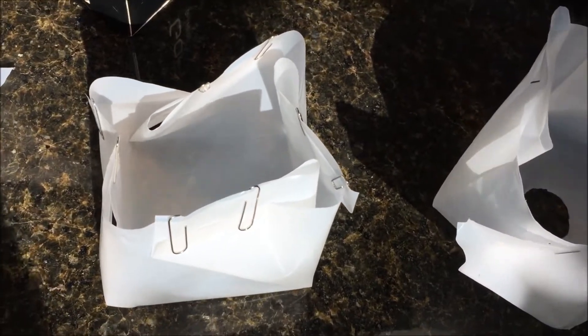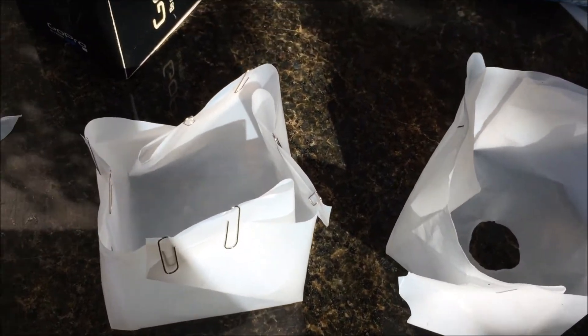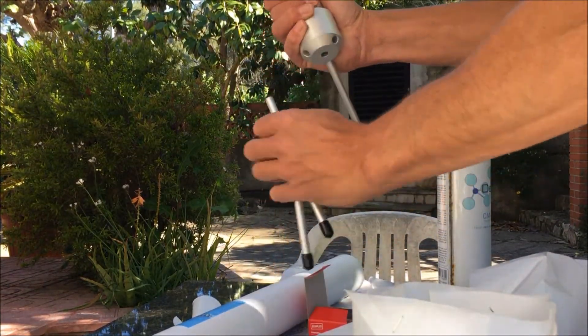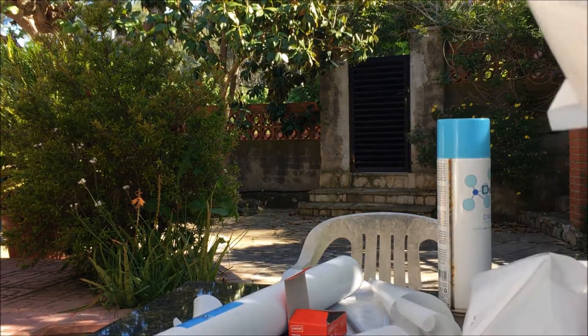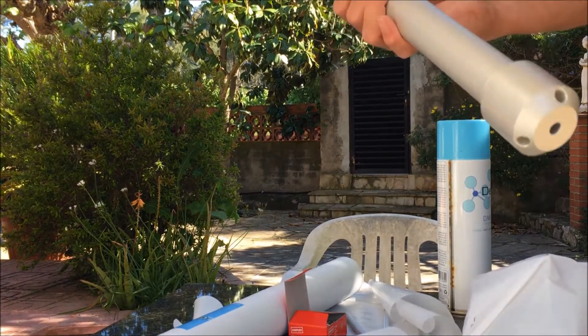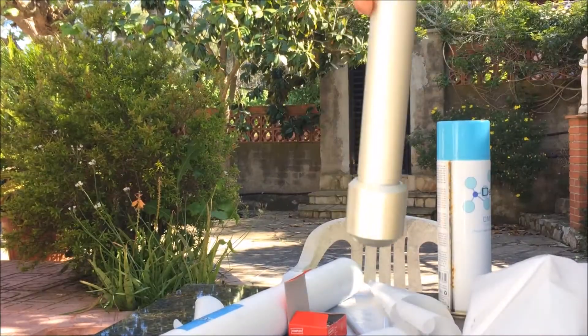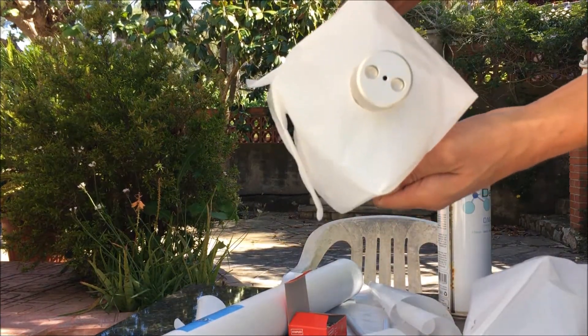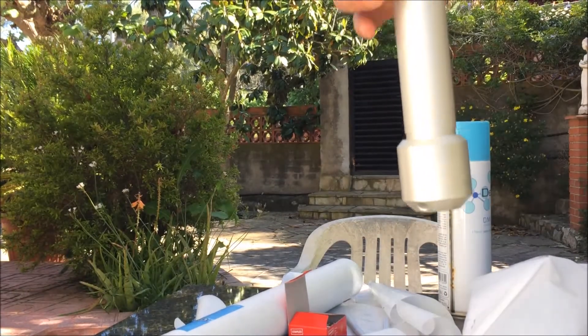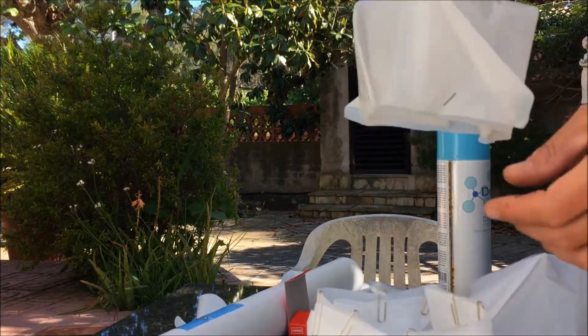Since the foil doesn't stick to the oil, you can easily get the oil out later. Using paper clips also means you may be able to reuse the PTFE foil — it's quite thick and bigger than other PTFE I've seen, so it will last longer. The hole in one box is because if we want to really shield off the extraction liquid, it has to be closed off completely. The end of the extractor should more or less end up inside a closed box. The hole is just big enough so the extractor slides through, but the lower part — which is larger — keeps it from sliding all the way through, so it can hang in place.